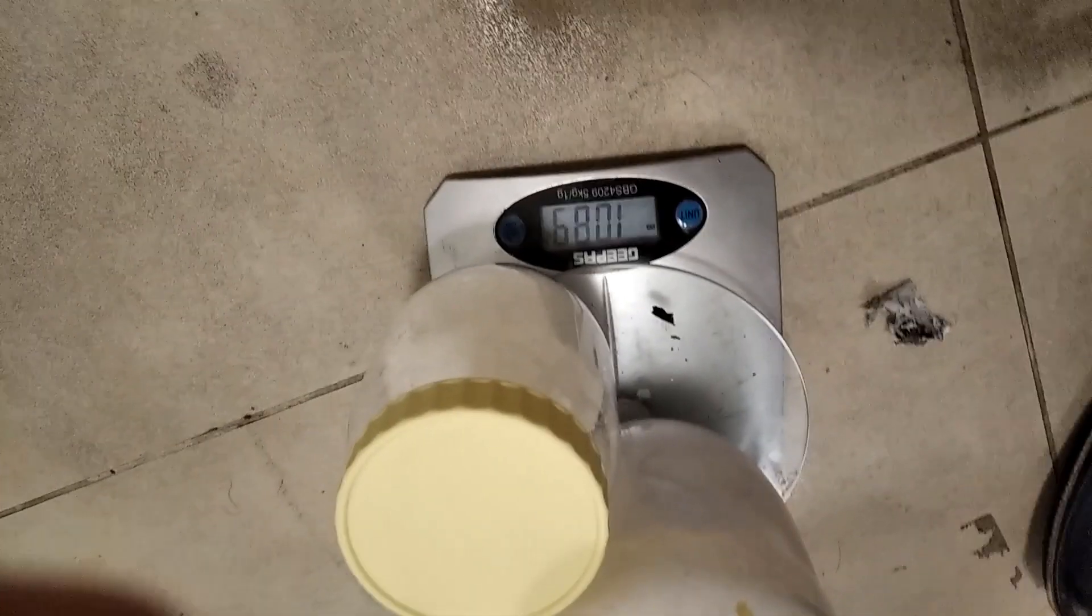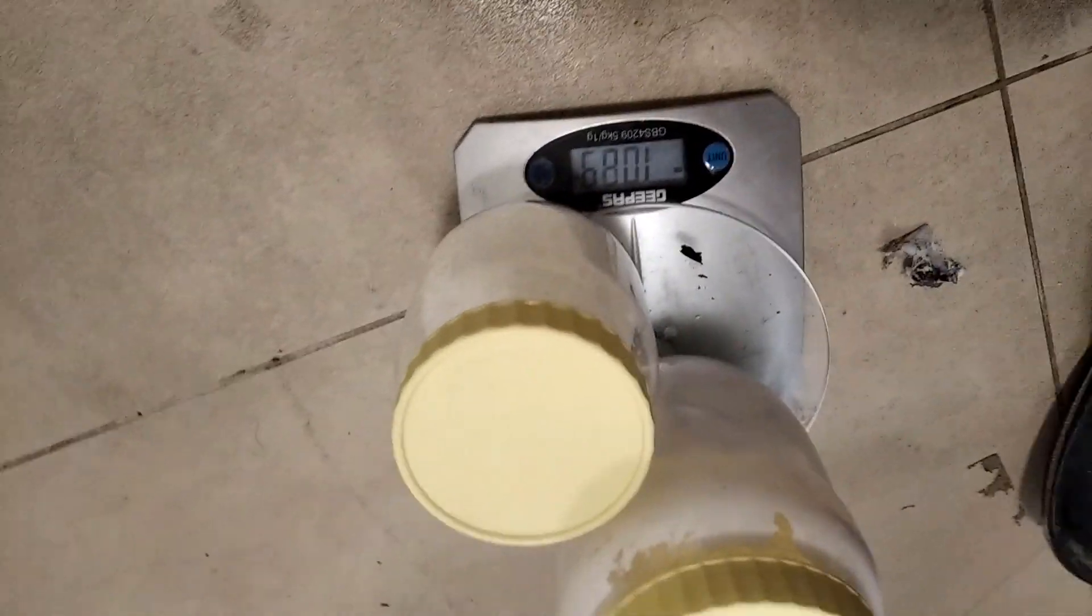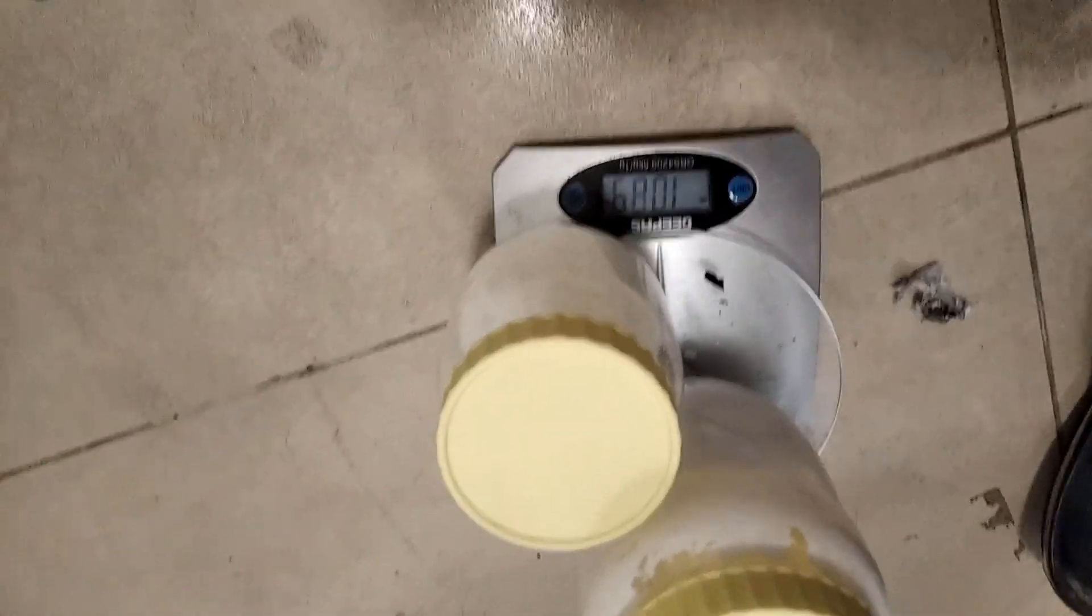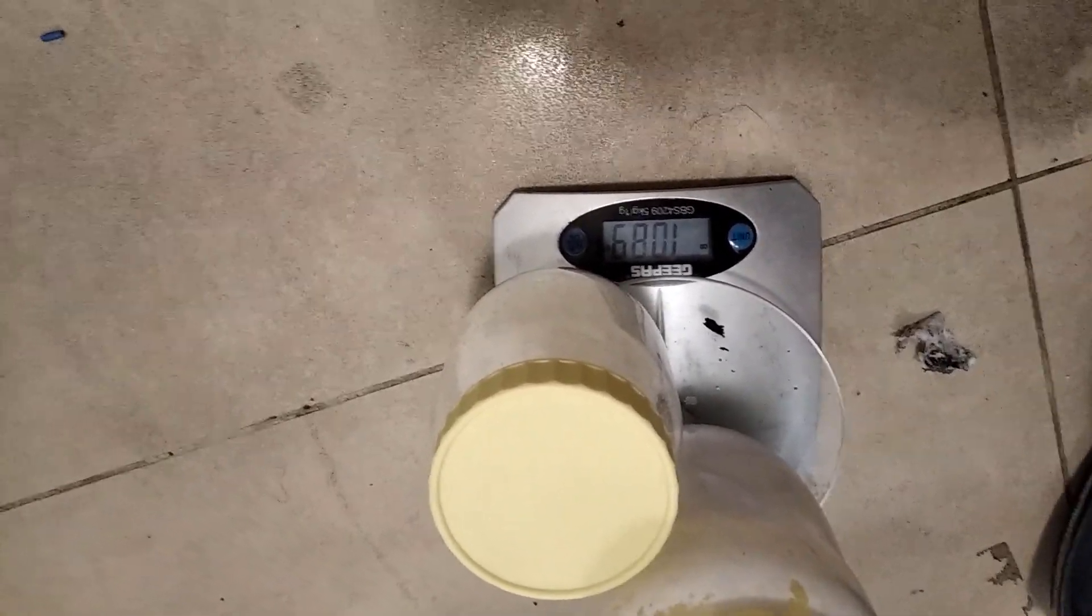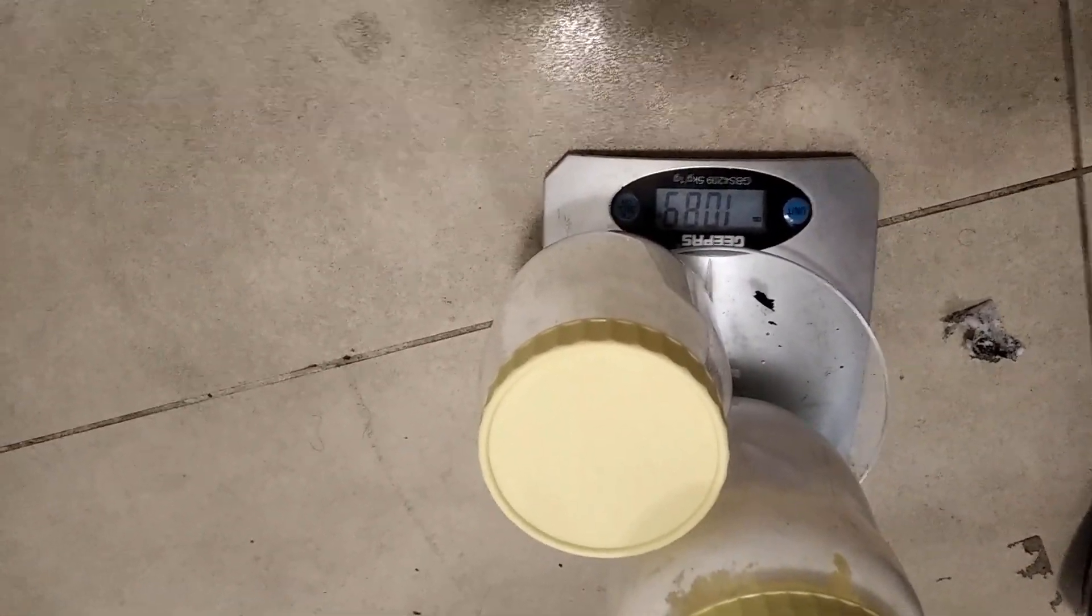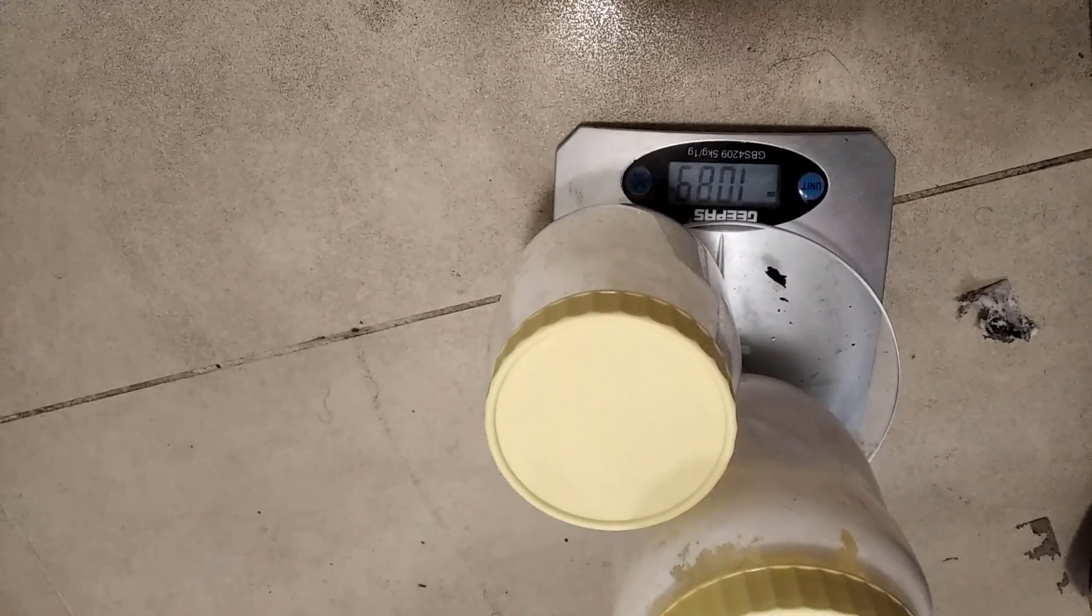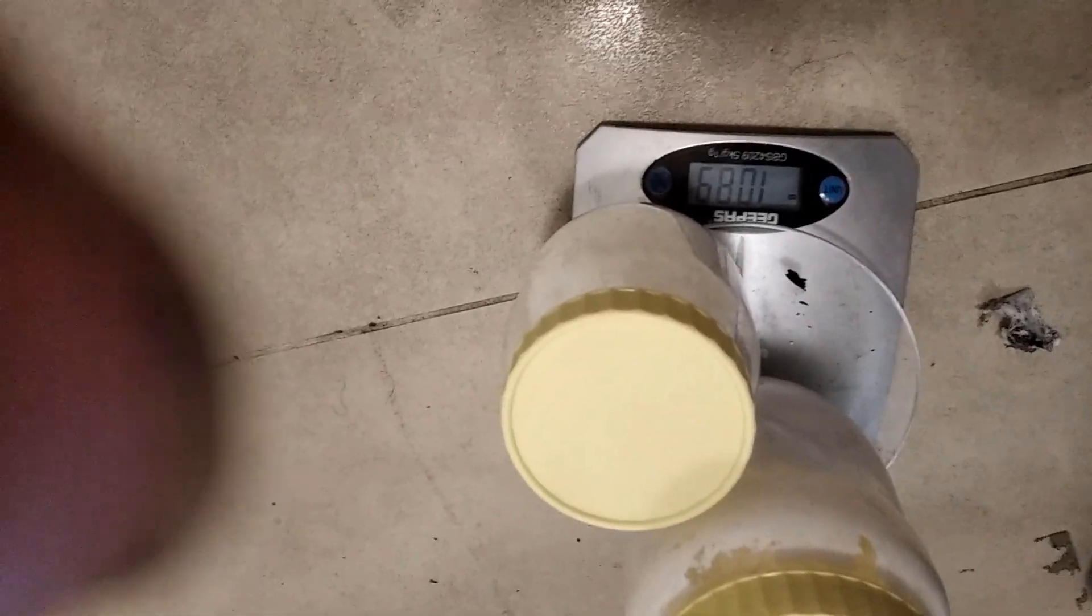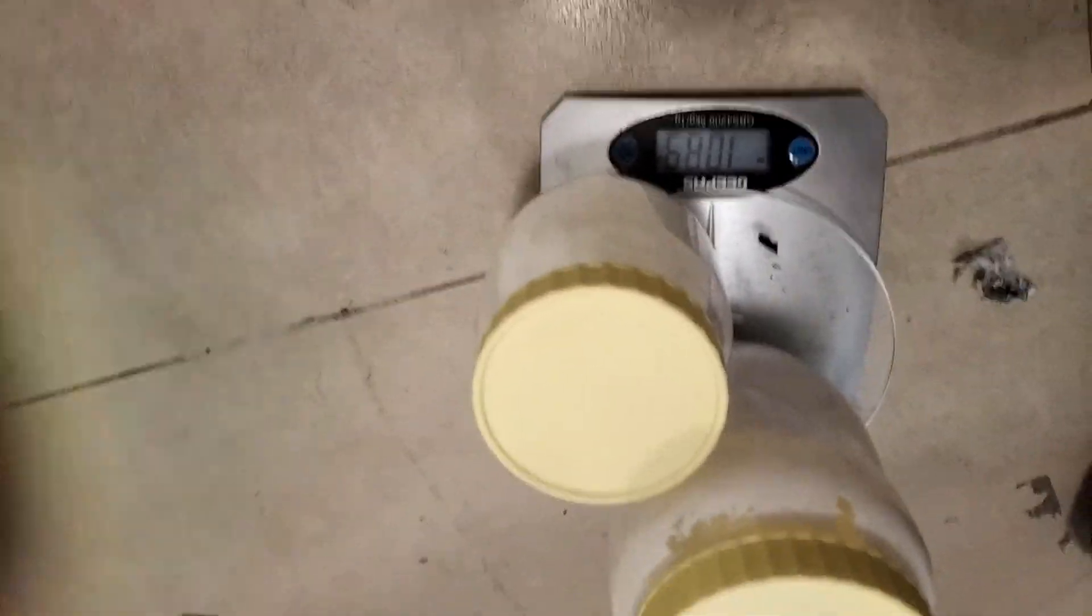So here I have weighed the total amount of yield. I took so many fractions and probably lost a lot of product, but it came down to about one kilogram of chlorate. Which is kind of low. That's probably due to the buffer and me experimenting with keeping the temperature low, even though I shouldn't have done that. Because apparently 60 degrees is where you want it to be at. I was just being paranoid.